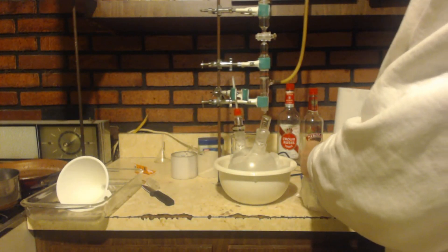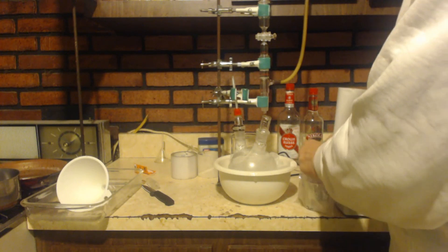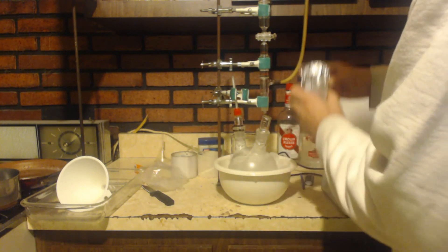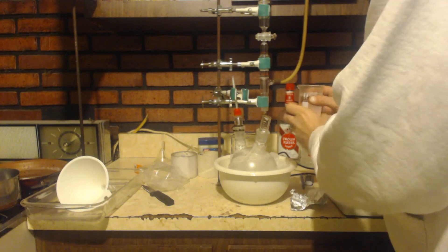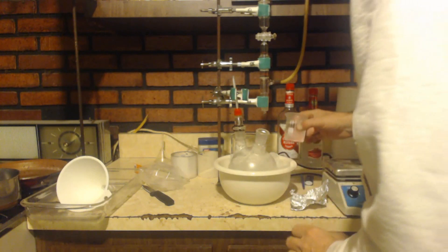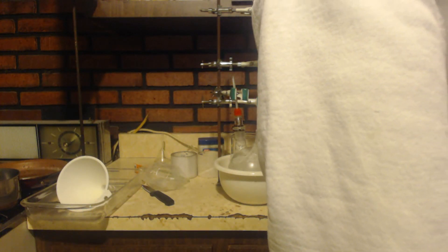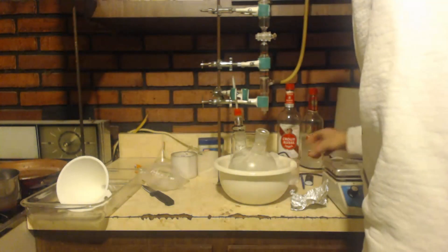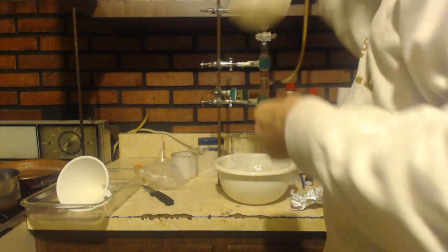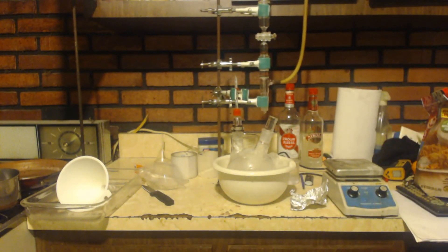So this has been a long time. It went up to 30 degrees Celsius. We'll try this time again. Try to keep it colder this time. I think I'm going to keep the temp. I didn't really have it in an ice bath. I was just putting it in the freezer. I have it in an ice bath and I'm going to put it in the freezer in between things. And we'll see if this goes faster.